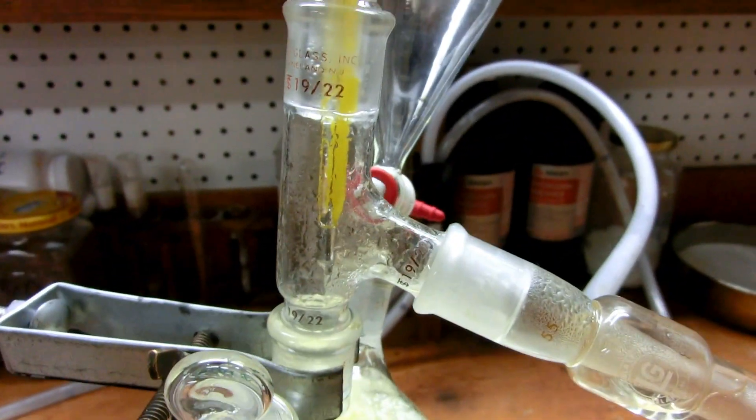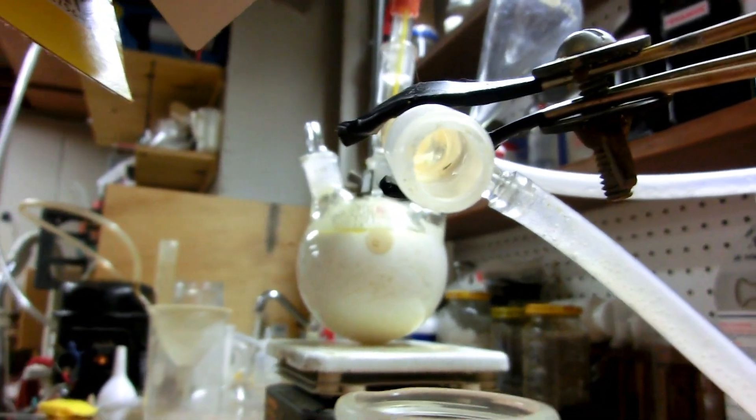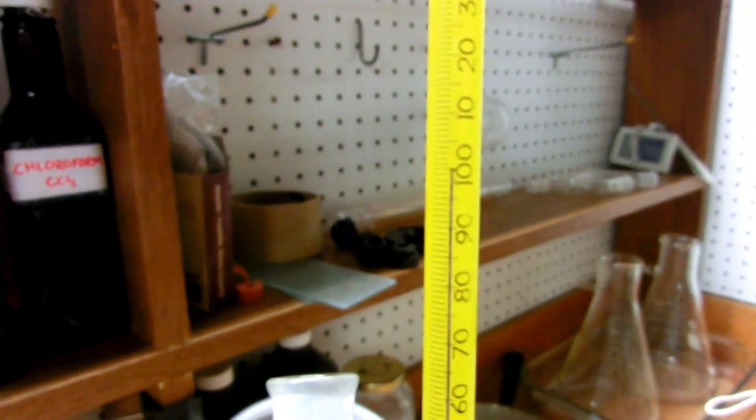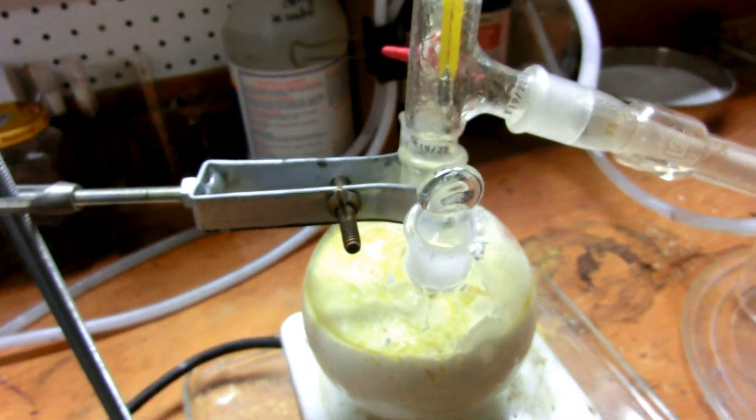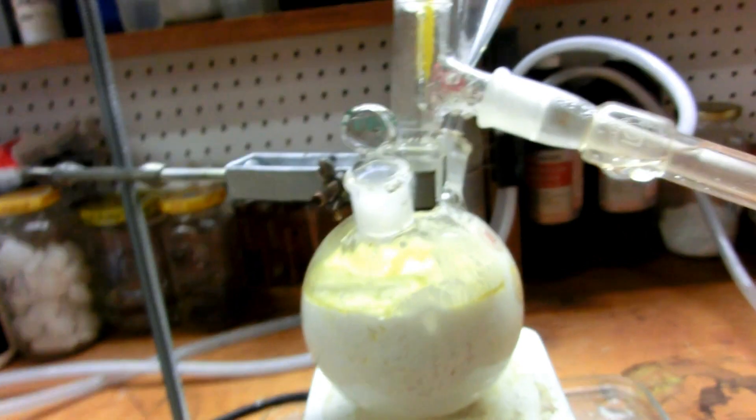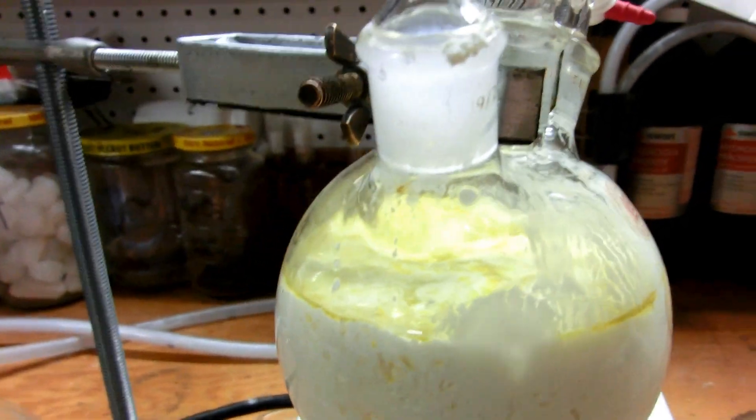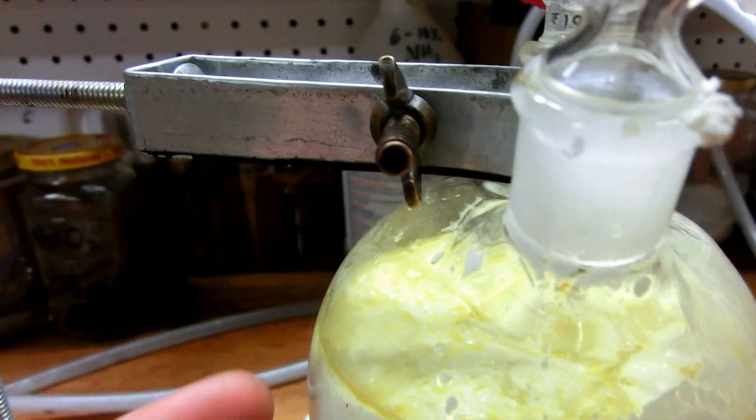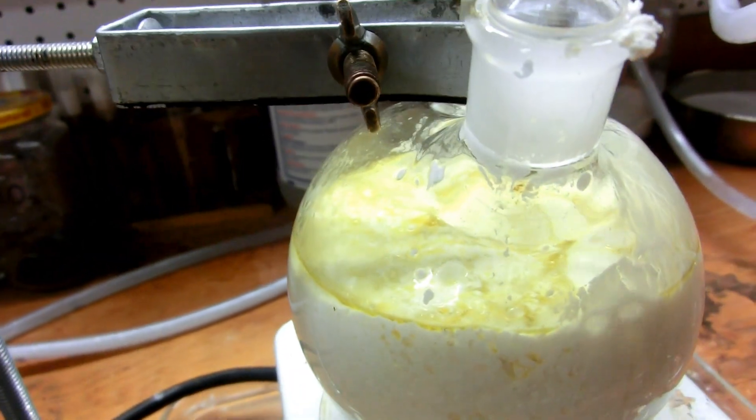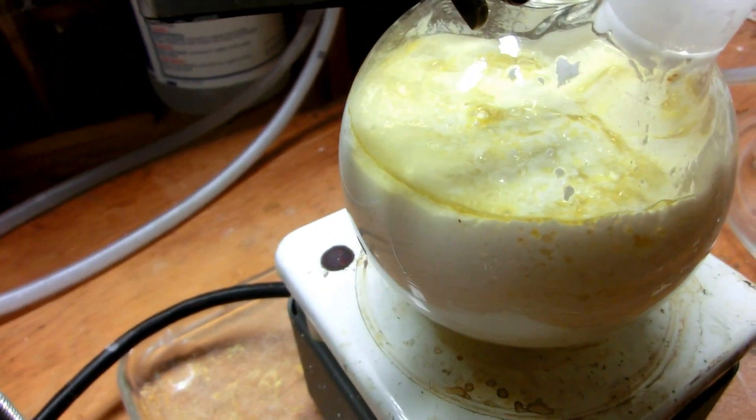Here's an update. We're just about to get our first drop of distillate. You'll notice there's nothing in the receiver. If you look up the condenser, you can see that no droplet path has been made yet. We're just now getting our first drop of distillate and we are at exactly 100 Celsius. Between now and 121 Celsius, we're going to get a mixture of water and nitric acid, a very weak nitric acid. Then at 121 exactly, we shall get our 68% as planned. Notice there's almost no brown fumes above this flask, actually above the constituents of the flask. It's just a little yellow coloring of the impure sulfuric acid. Compared to other nitric acid syntheses, decomposition is limited to a very small amount, if any.